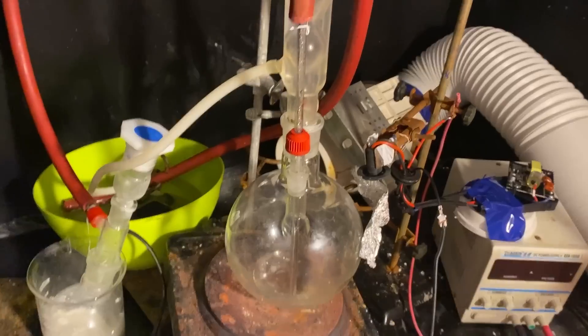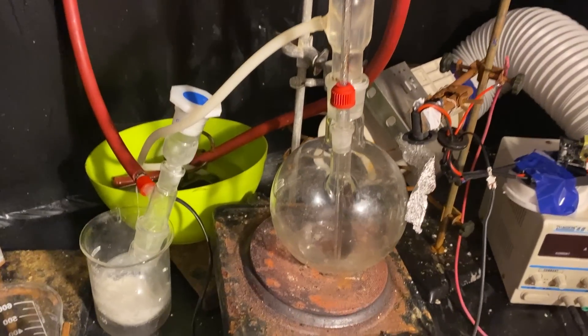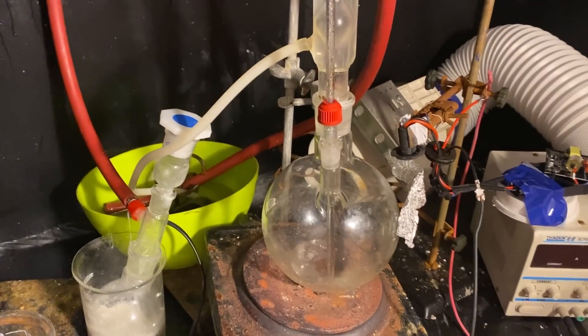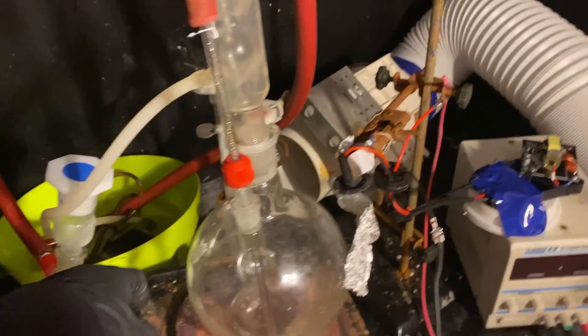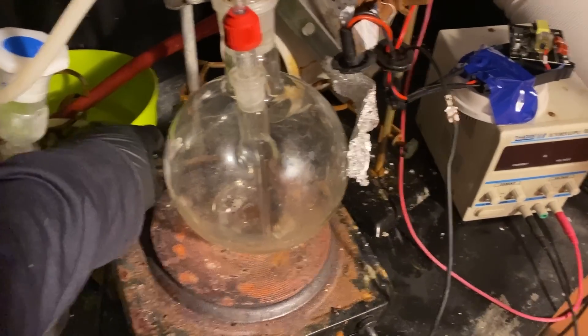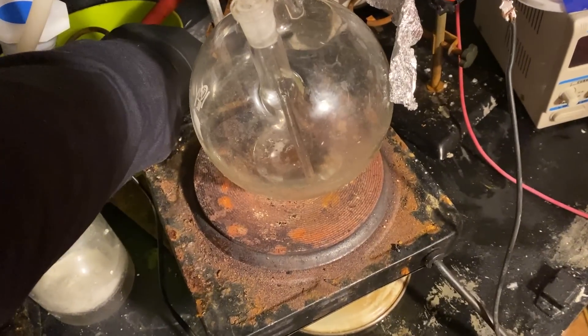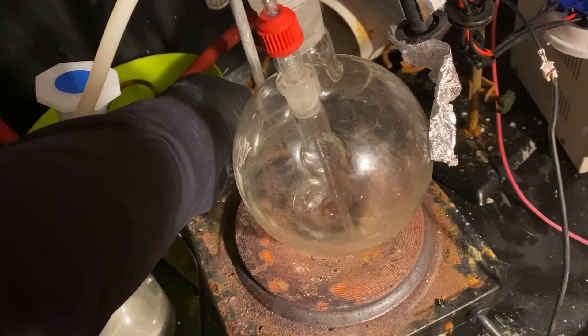Alright guys, before we begin, I just want to say that this is really stupid. Don't ever do this. You will probably die if you do, or give yourself cancer. I am currently turning on my hot plate and I'm hoping for the best.